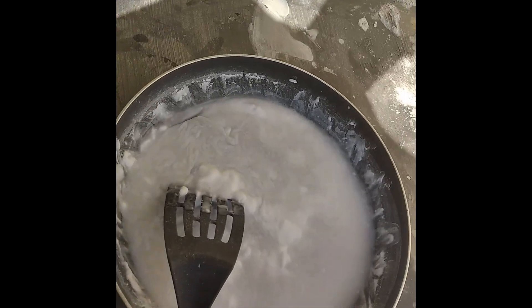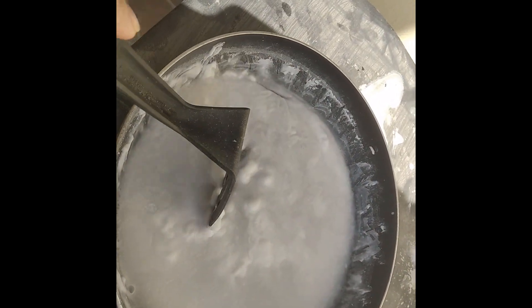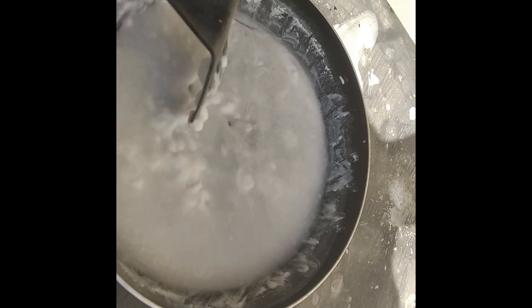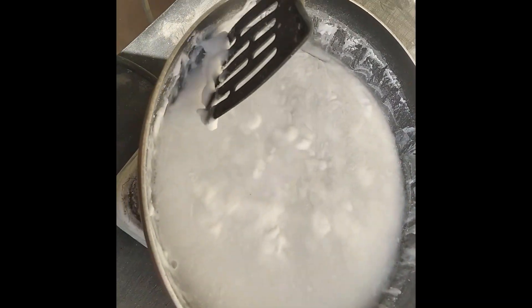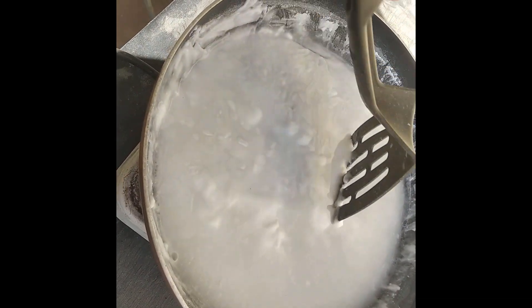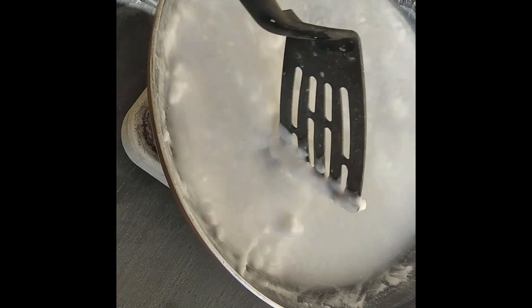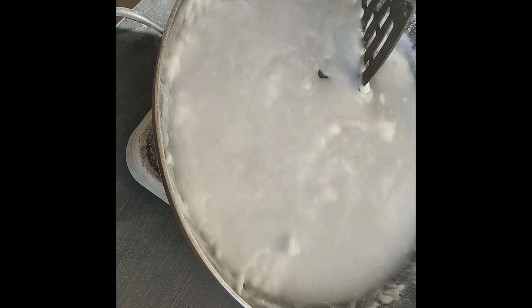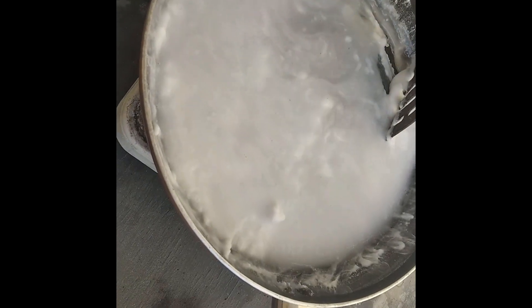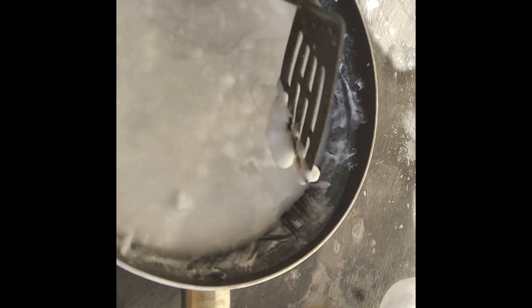What I'm going to do now is boil it down in an aluminum pan. Something weird is going on here. Normally when I crash out something like chlorate, it forms semi-moldable crystals. But this has the consistency of soft-serve ice cream — it's like a literal gel, but it's actually crystals. Maybe because it forms several types of hydrates. On the side it seems to be crusting, even though it's still drying.